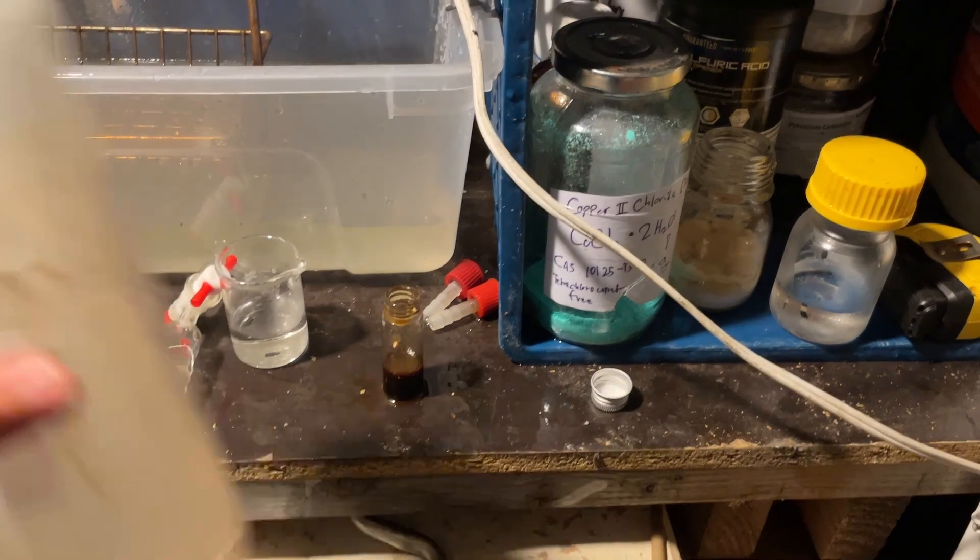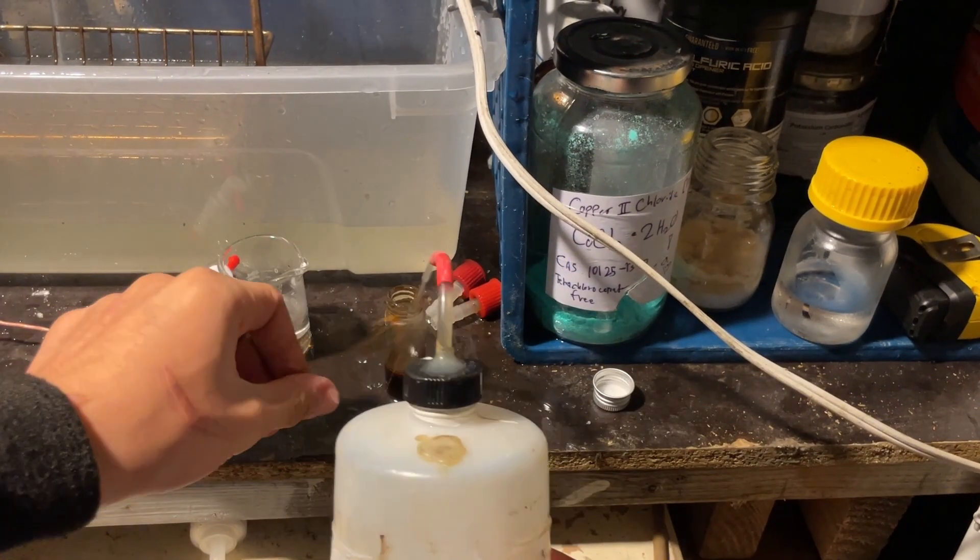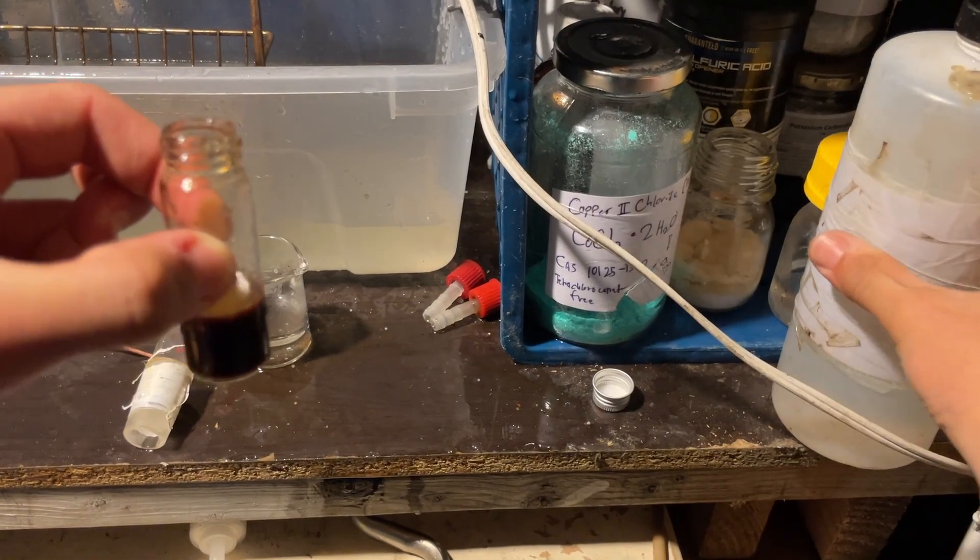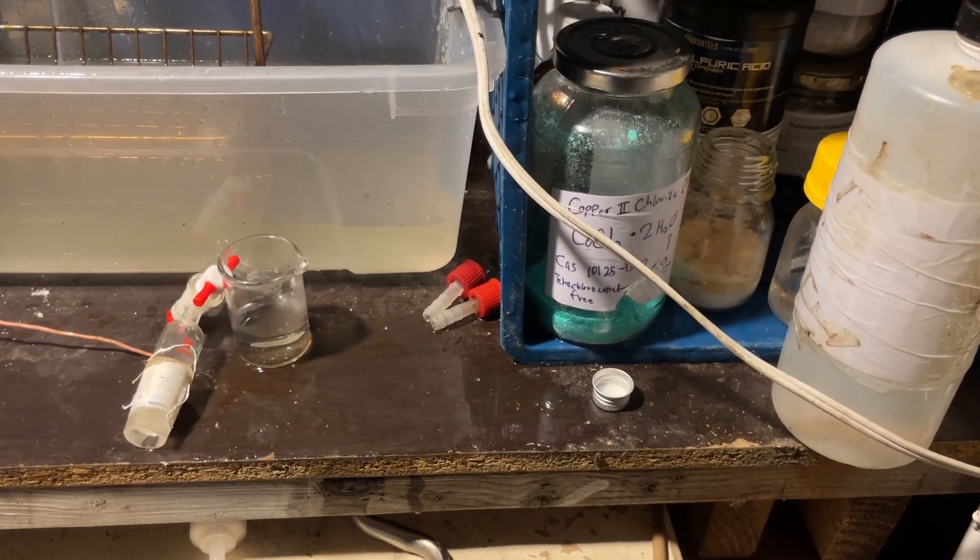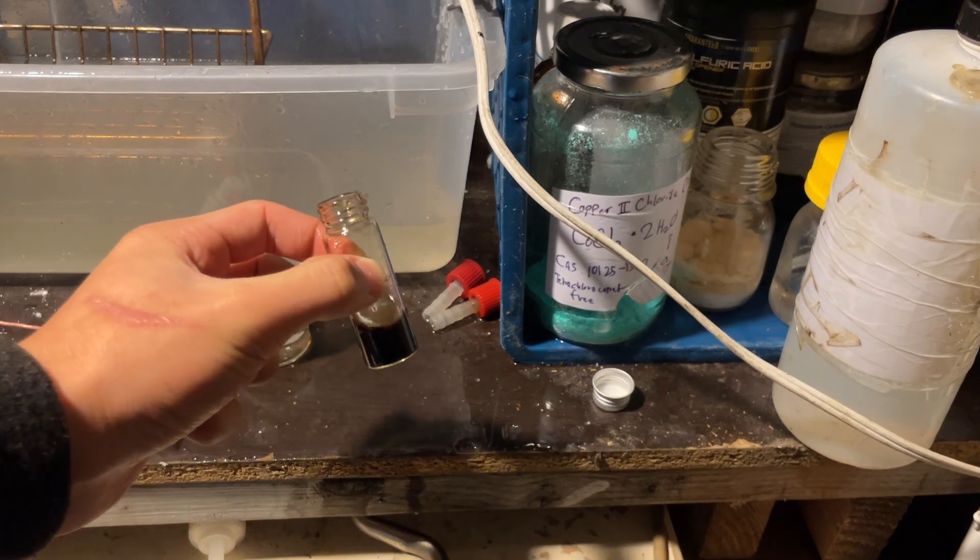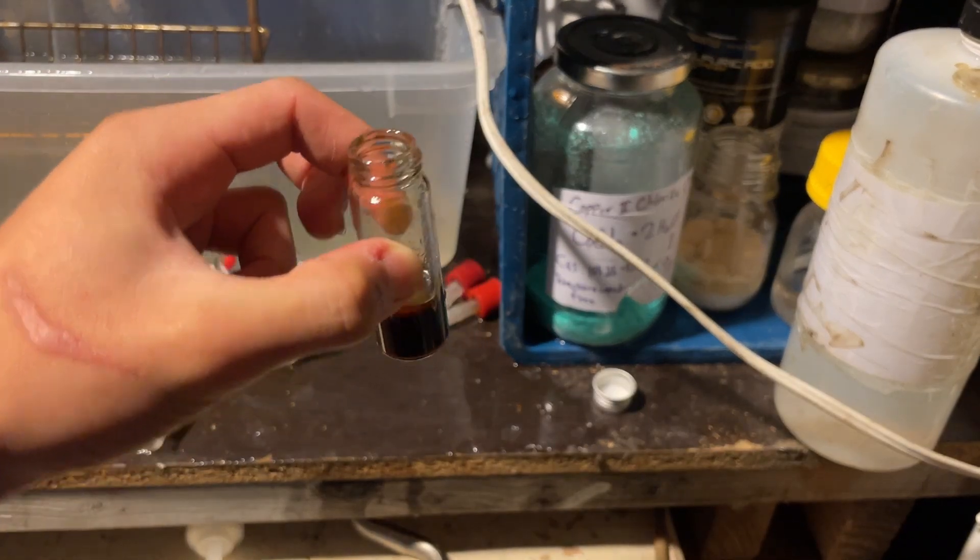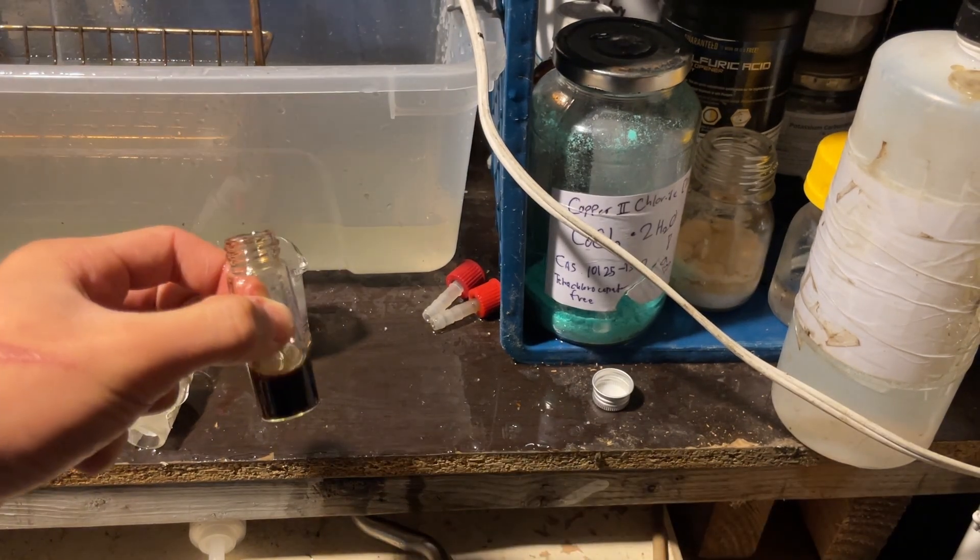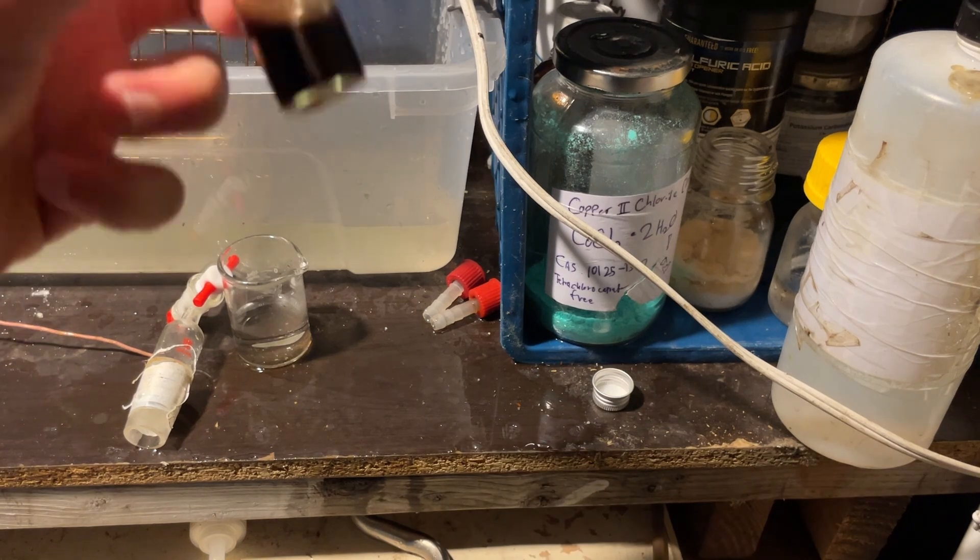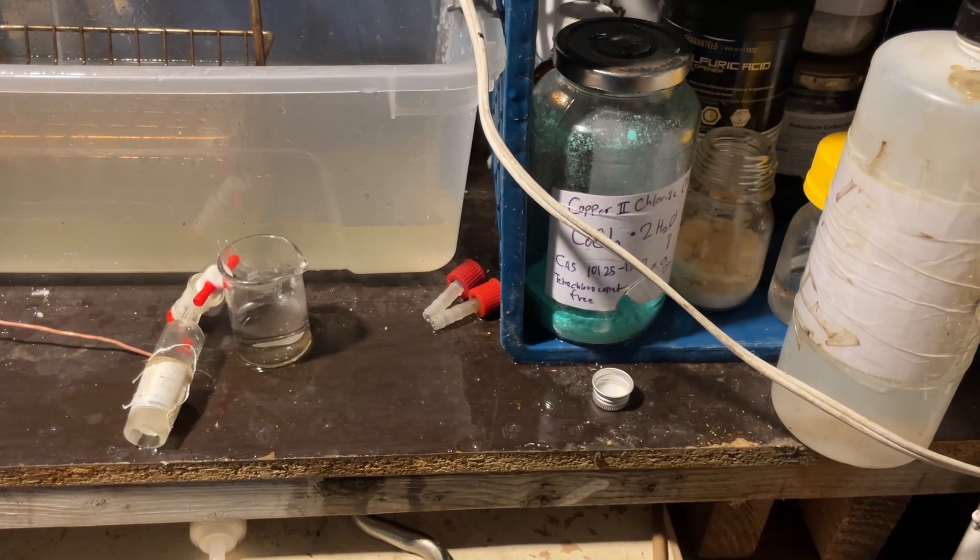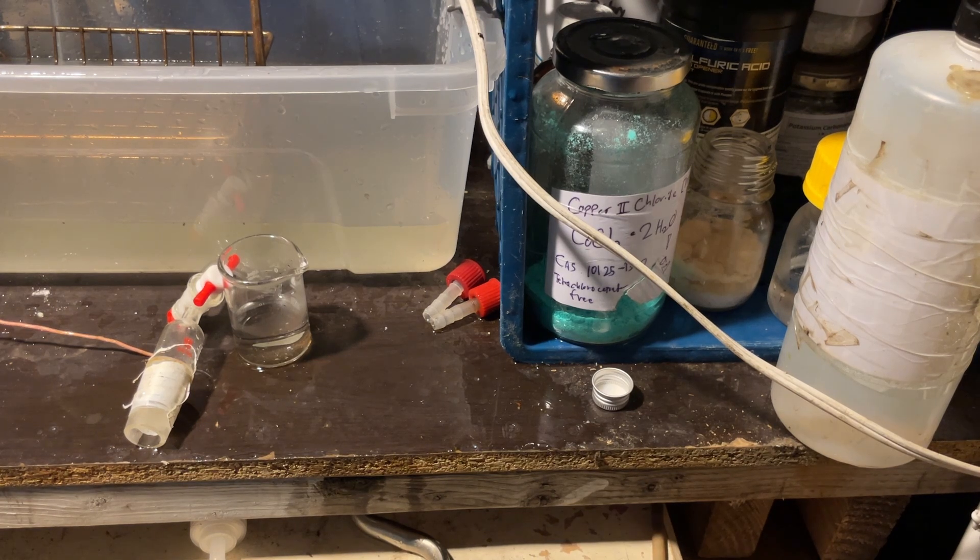Well, I'm just gonna quickly rinse this off. And smell it. Sickly sweet odor, similar to chloroform. With a hint of acetaldehyde. And also some sort of organic musky odor. Interesting. There's something chloroform there.